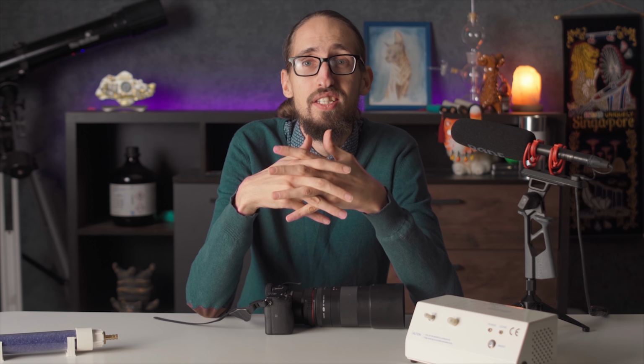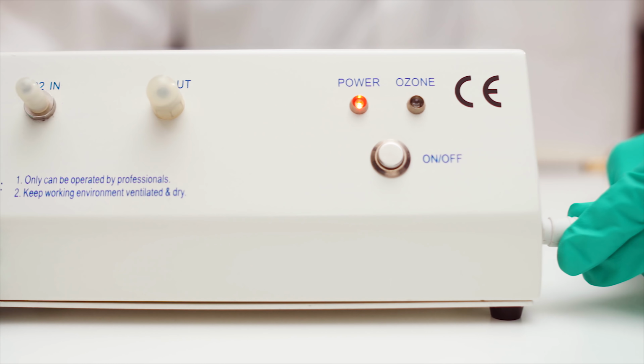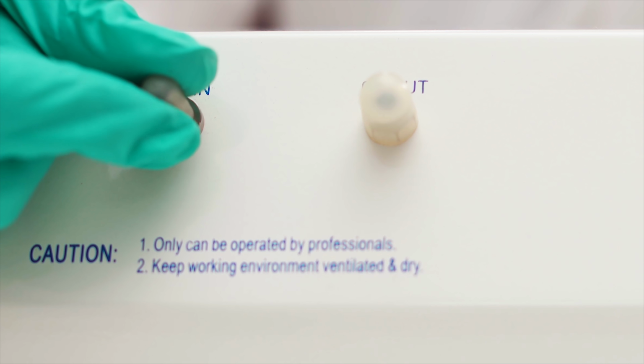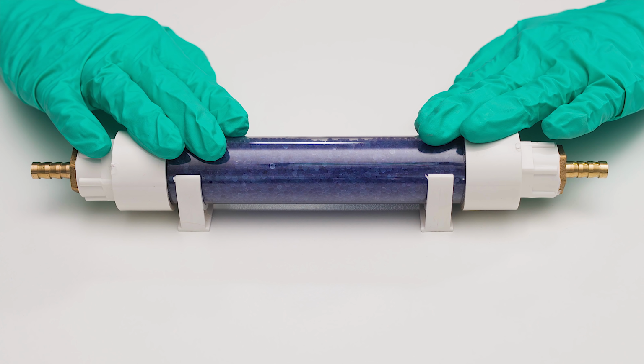that is using this ozone generator. This device is able to generate about 1 gram of ozone per hour. To operate this device, it needs to be connected to a permanent oxygen flow, delivered via oxygen cylinder. However, simple oxygen from a balloon won't be enough to get highly concentrated ozone.